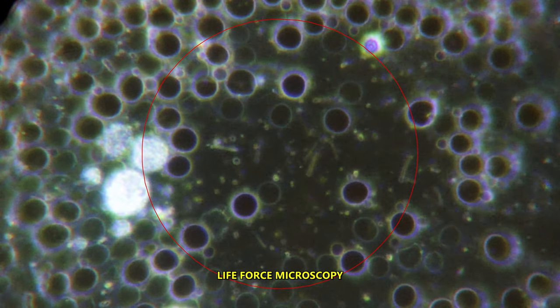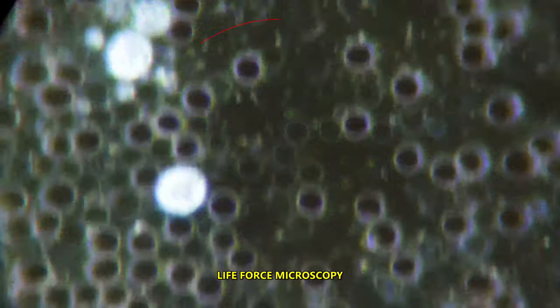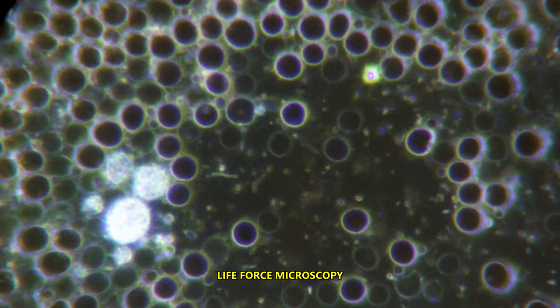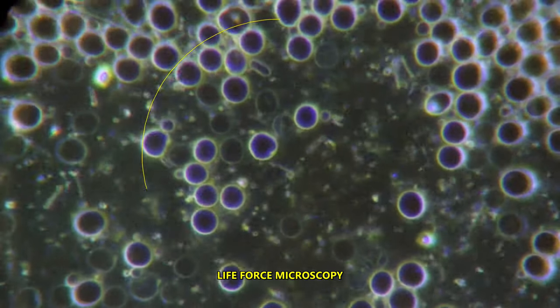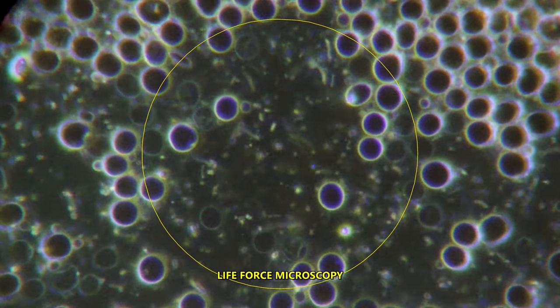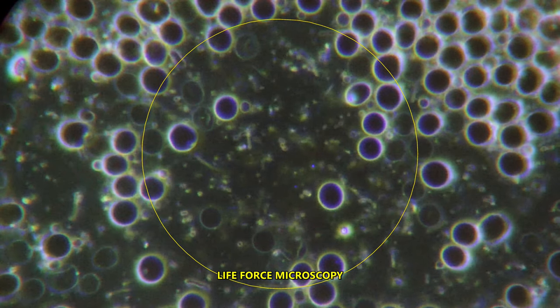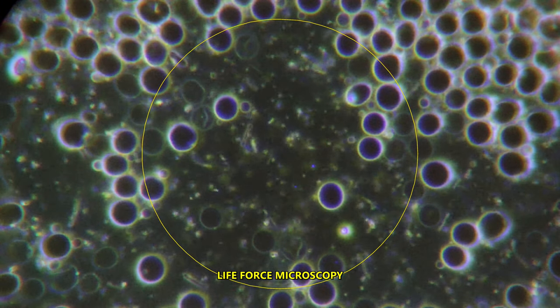All these little particles that we see are definitely abnormal and they shouldn't be present at all. They look like little tiny dots, sometimes different shapes like interlinked chains, little snake-looking things moving around. All of these things observed are pathogenic.